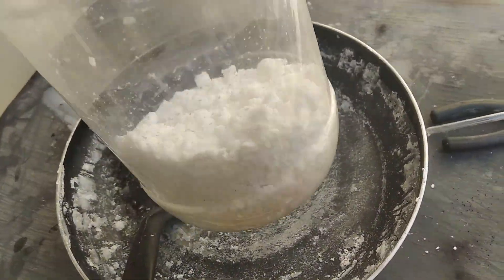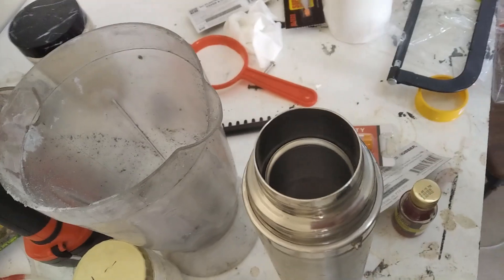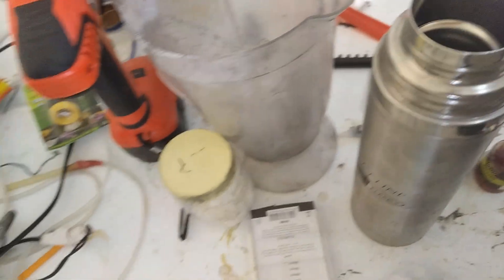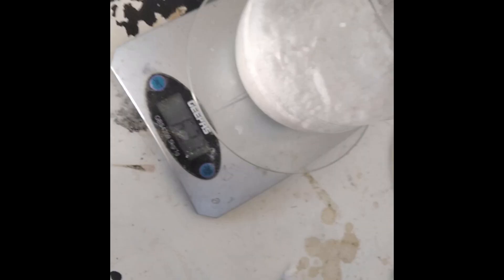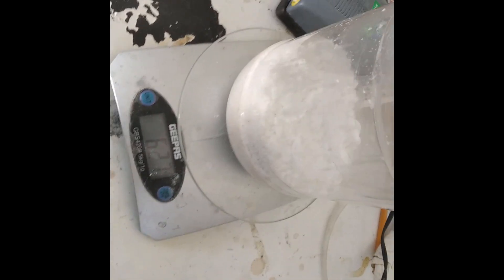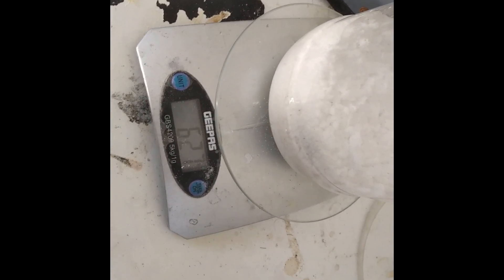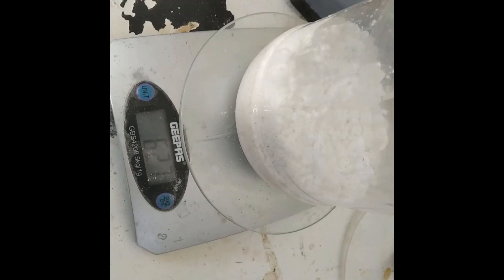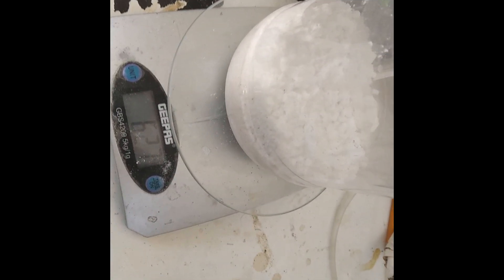Overall, we got around this much — I'm not sure exactly how many grams. I don't really know how much chloride I started with; I assumed around 600 grams, or maybe around 400 or 300. We ended up with 627 grams of crude product, which is mostly perchlorate with some remaining chlorate. I'll deal with that remaining chlorate once I get acetone to actually separate the two.